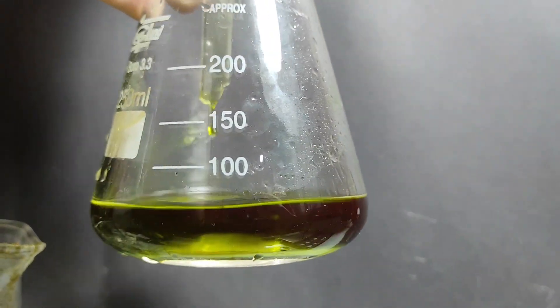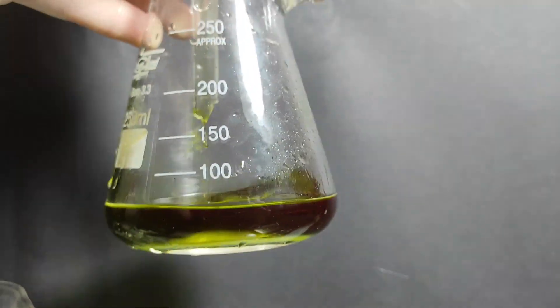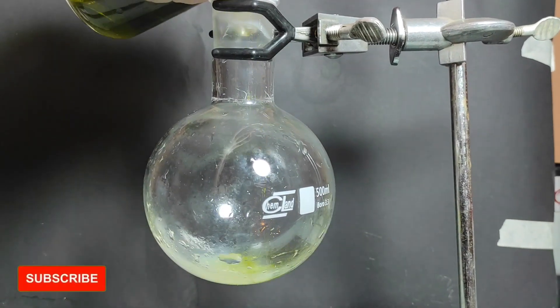This is the f***** extract and I must say it actually has a really nice green color. The extract was then poured into a boiling flask.